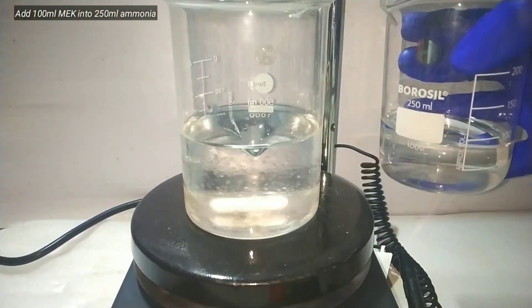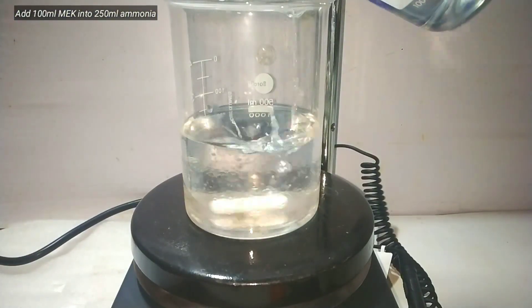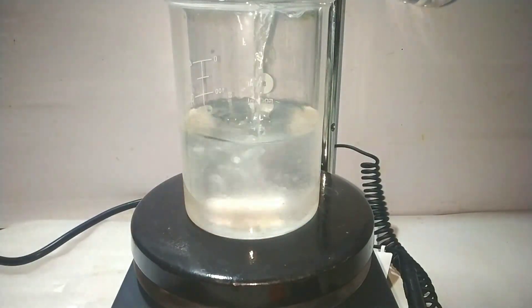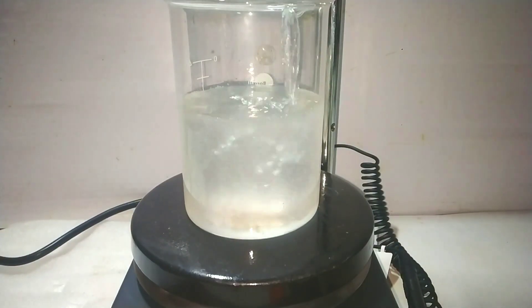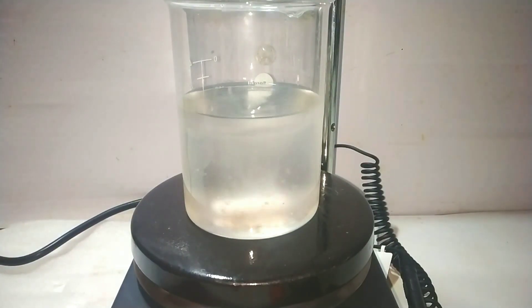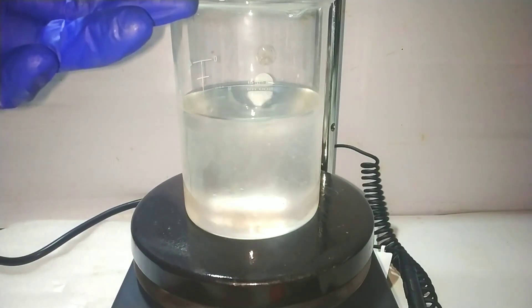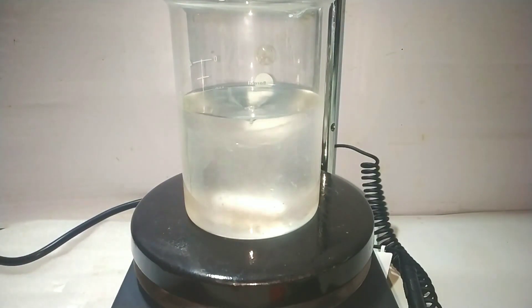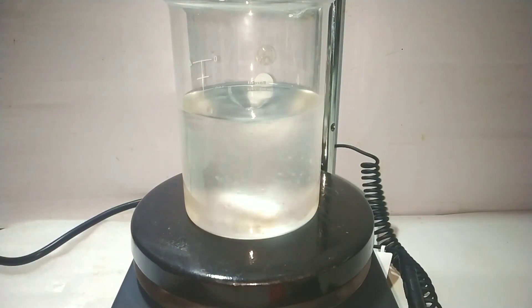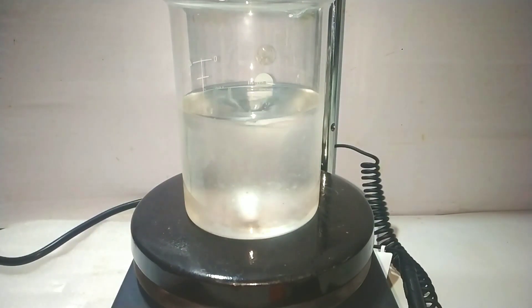Next, we add the 100 ml of methyl ethyl ketone to the ammonia solution. This should be done with constant stirring. Let it stir for 5 to 10 minutes so that it is mixed well.